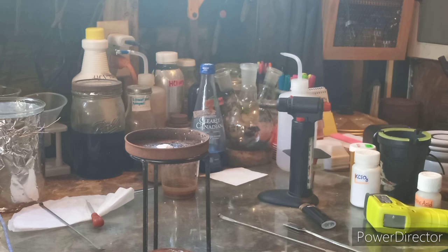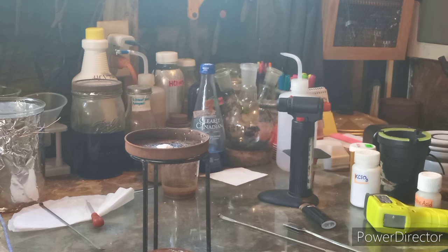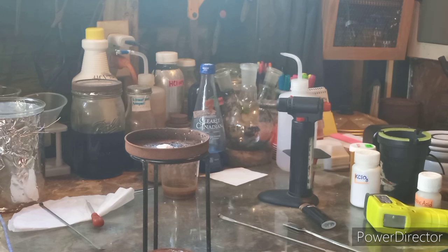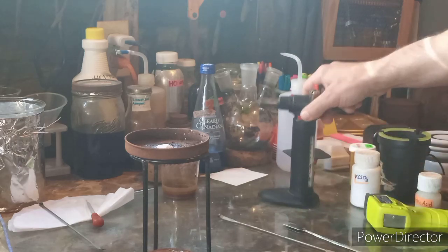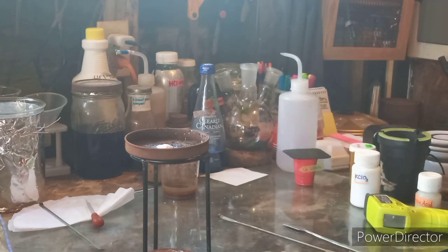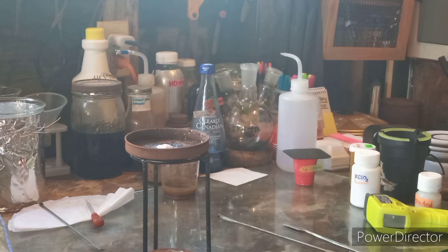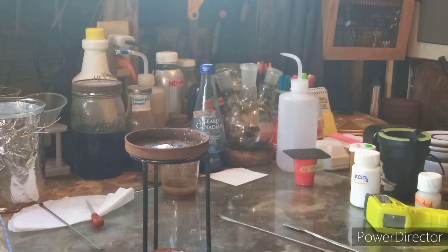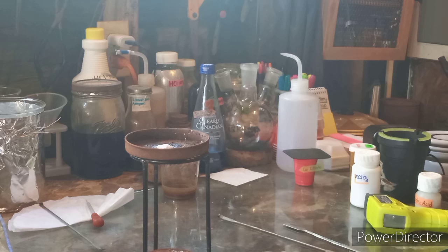Okay, guys. As I said at the beginning of the hypochlorite and hydroxide video through electrolysis, one advantage of doing this process is that it leaves it open to an easy way to get your own potassium chlorate — that's KClO3.